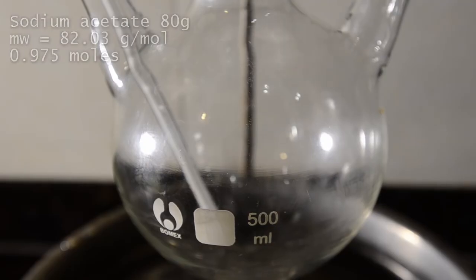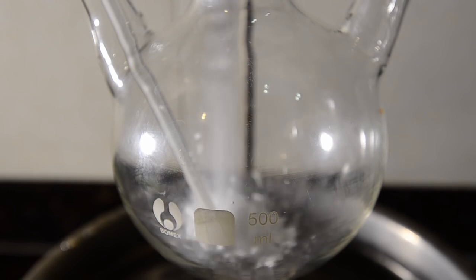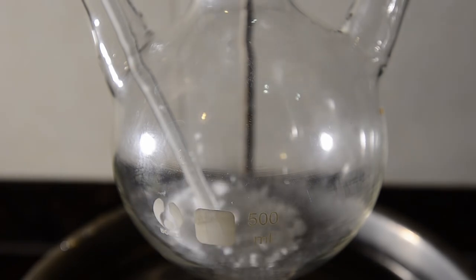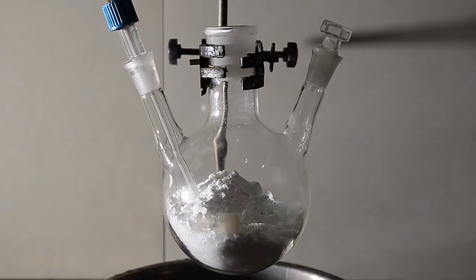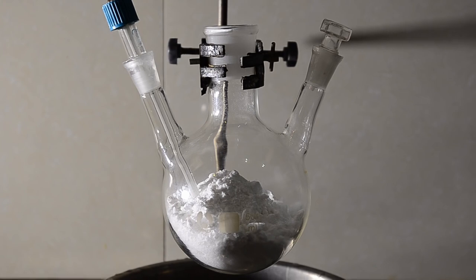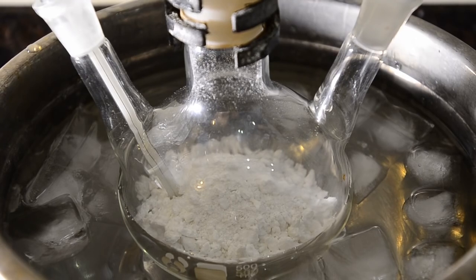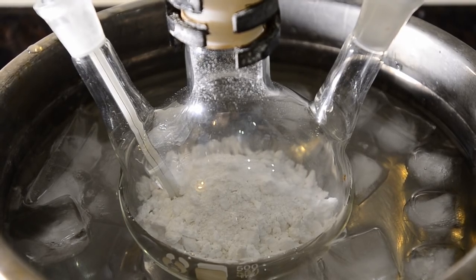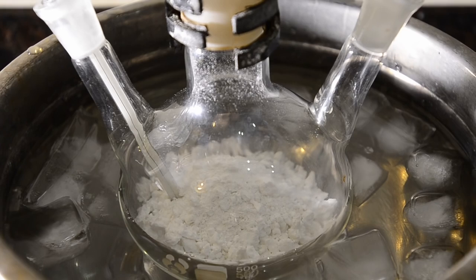Weigh out 80 grams of anhydrous sodium acetate and place this into a dry 500 ml flask. We've added a thermometer to track the temperature. Now stopper the flask and place it into an ice bath and get the contents as cool as you can.